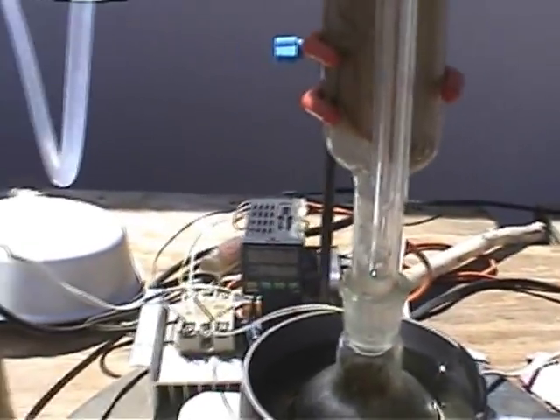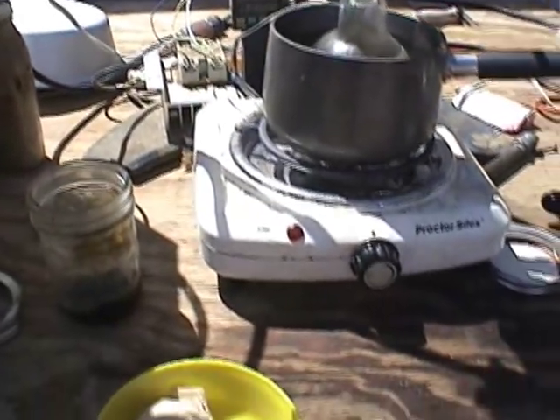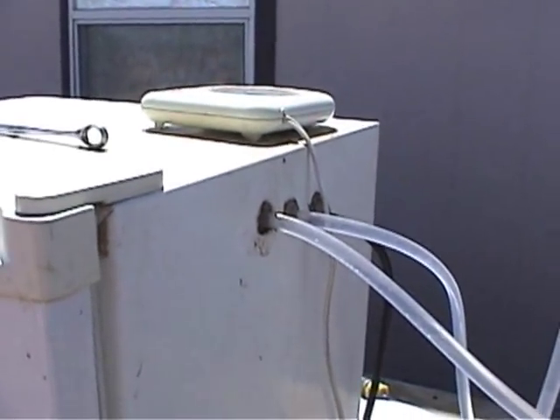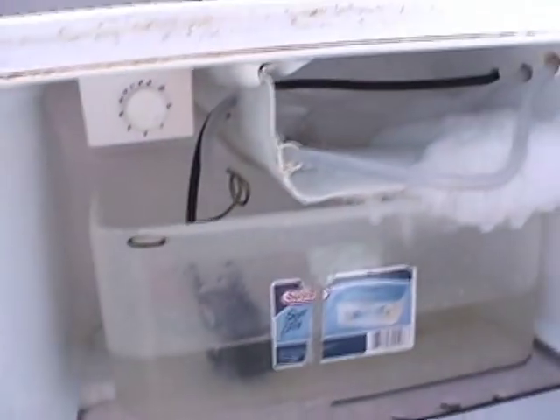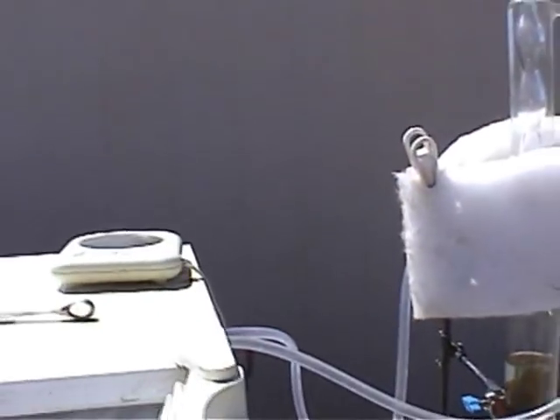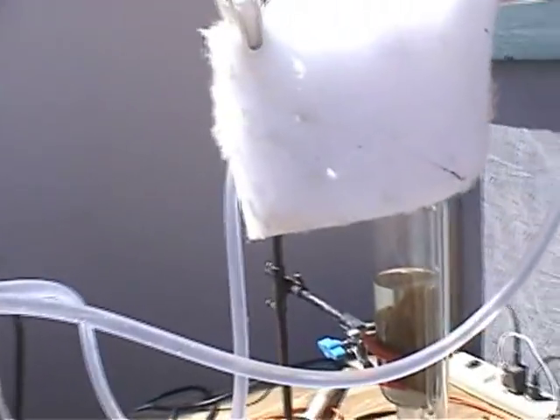I'm going to interrupt the process, but first I wanted to show you the rest of the setup. There's my sample that I prepared, and there's my jar that I put everything in when I'm finished. Here's my modified refrigerator — I had a spare 2 cubic foot little refrigerator-freezer. I punched some holes in the side for plumbing and electrical. I took a tote and cut it down so it would fit in there without interfering with anything. I run the return water on the evaporator to cool it down, then I pick up the water with a little pump and run it up to the Soxhlet. Thanks to everyone's comments — a lot of them were very helpful in getting this thing set up to work well.